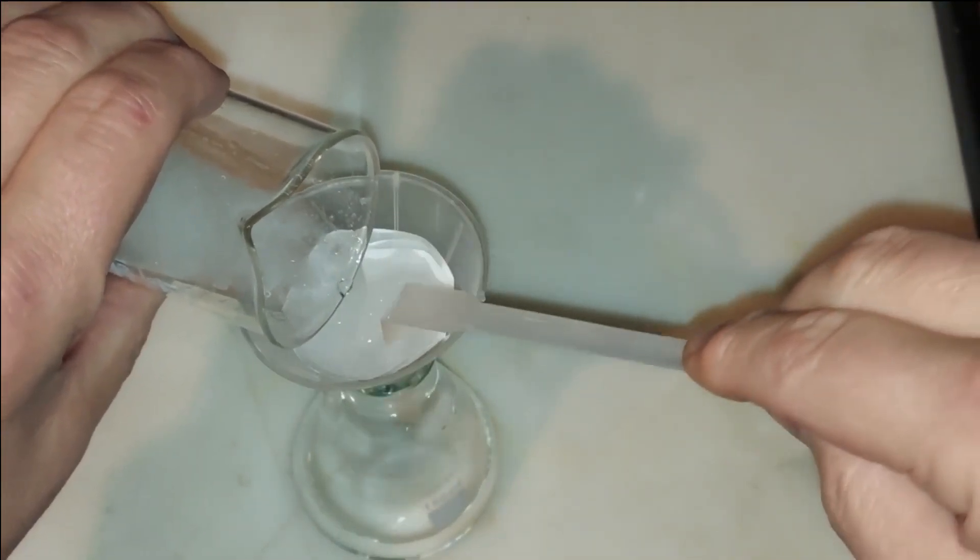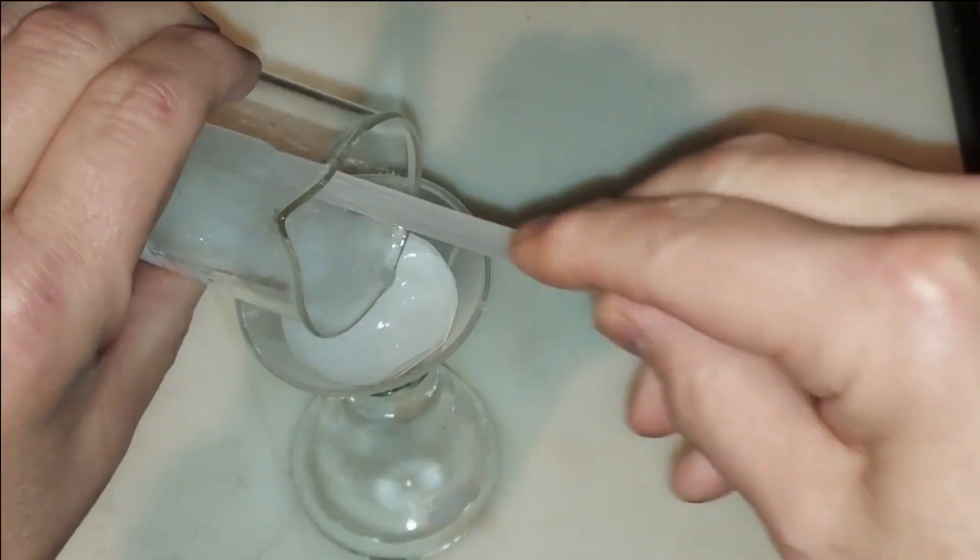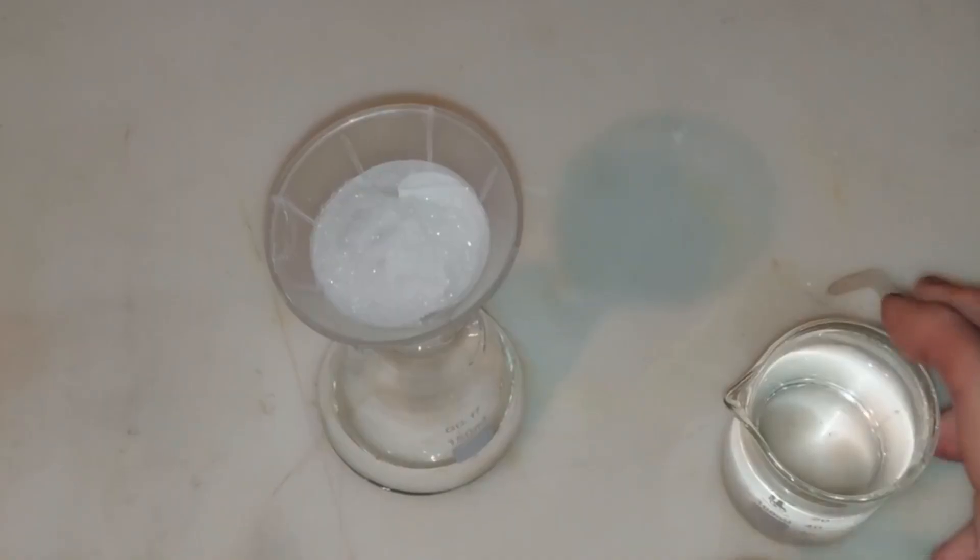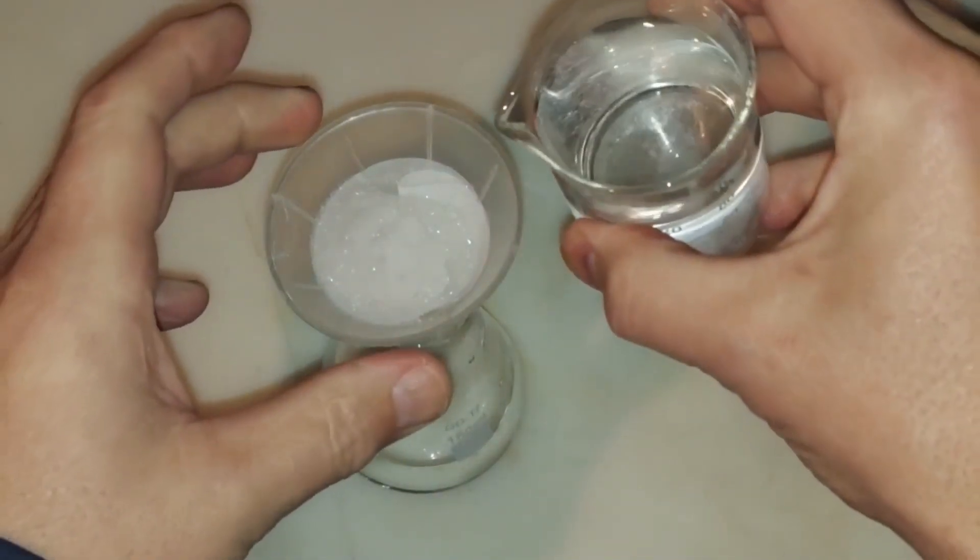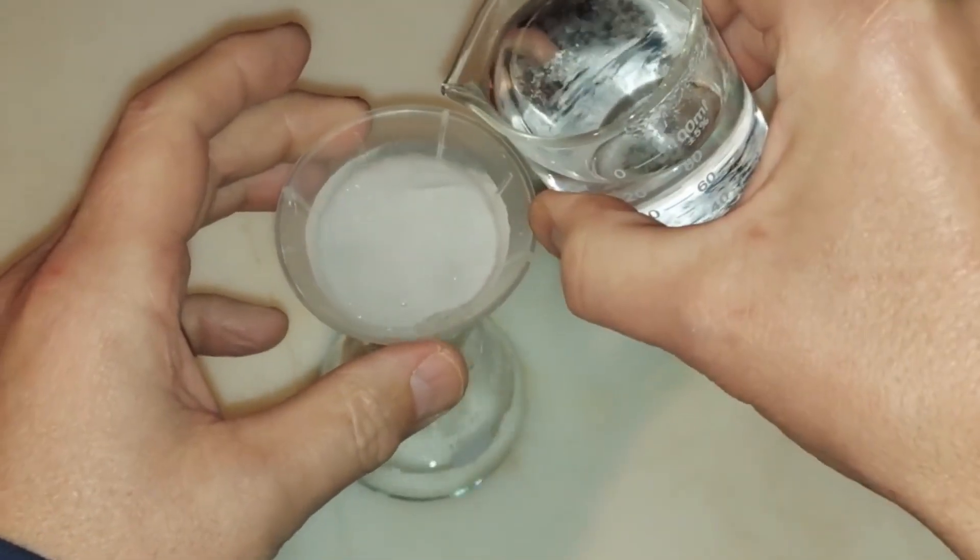All right. So I'm going to go ahead and filter this out and wash it with cold water, cold distilled water, and dry them. Filtered through pretty quick. So I'm going to use some cold distilled water now and wash these crystals. This will take longer, but this is how you do it.